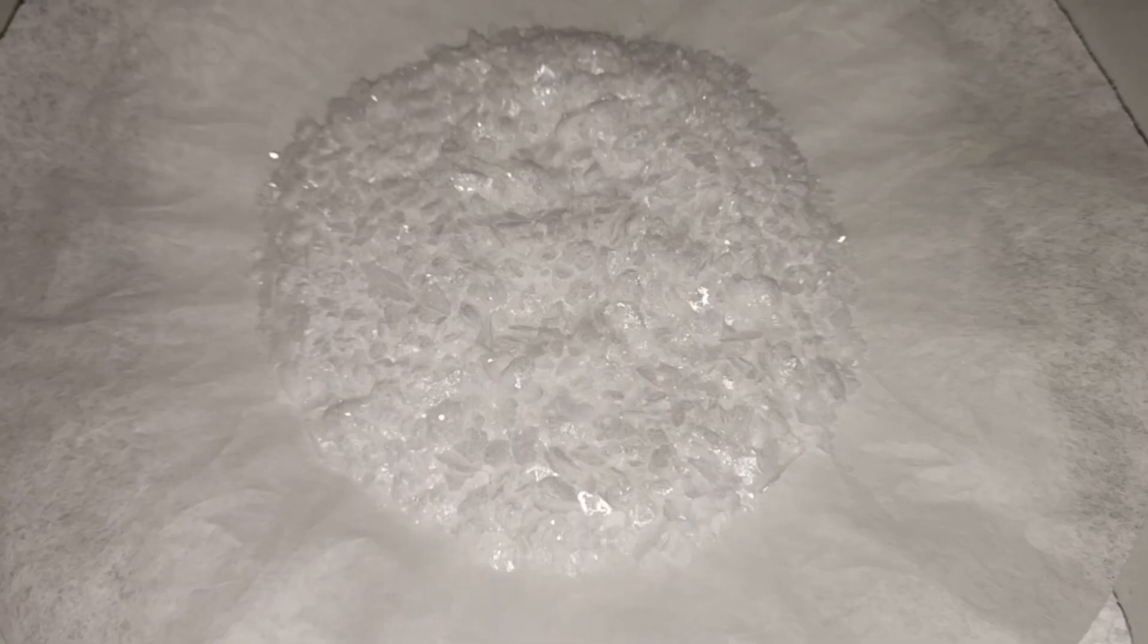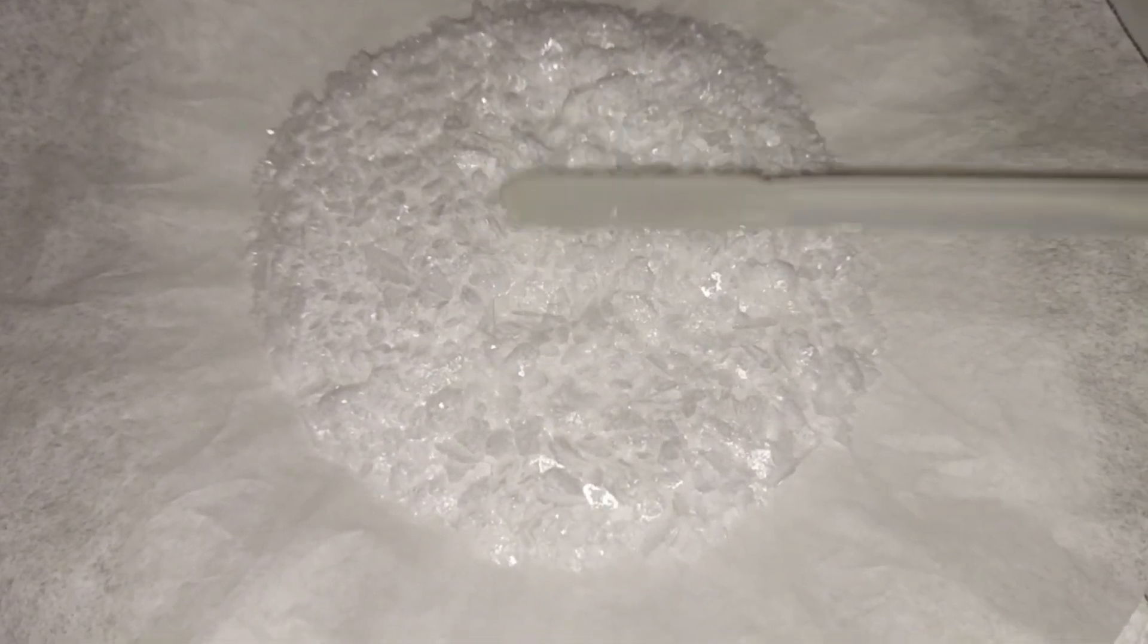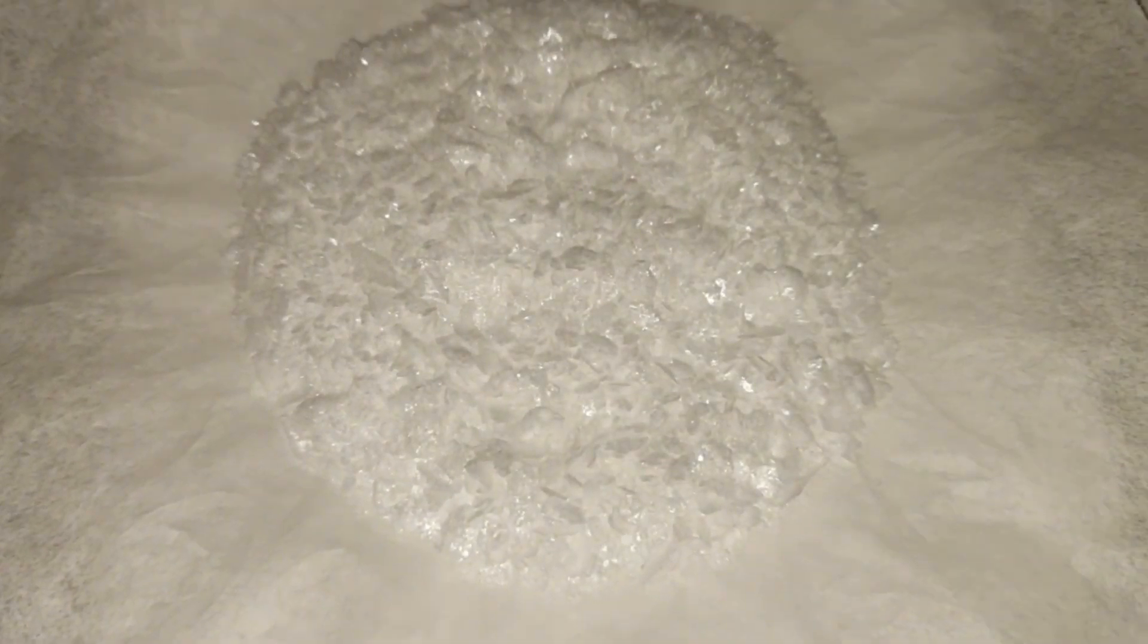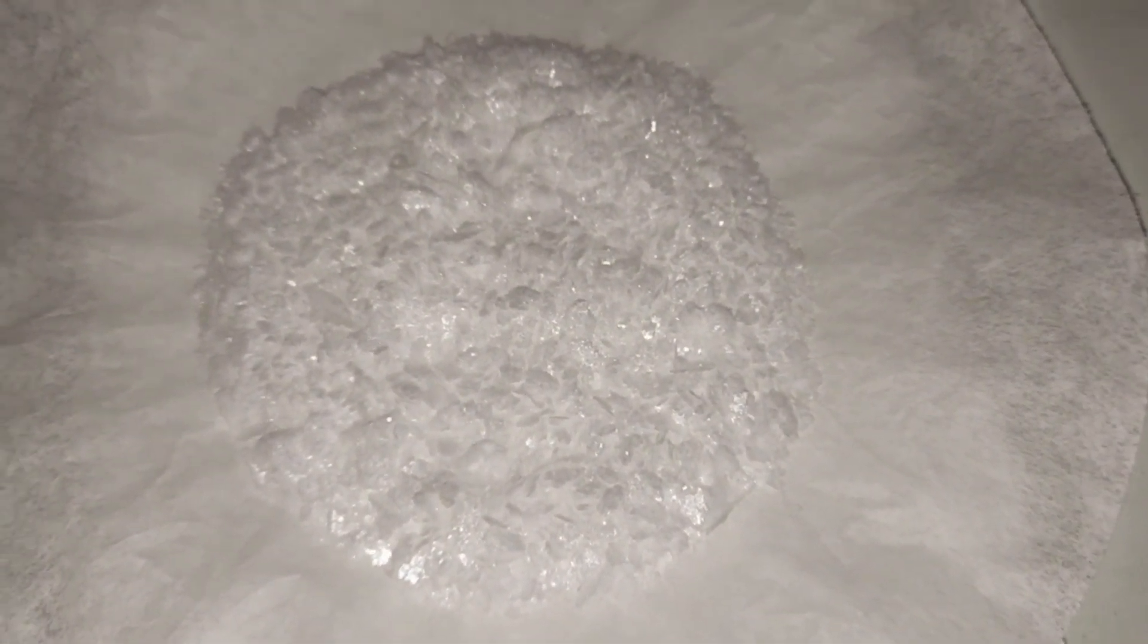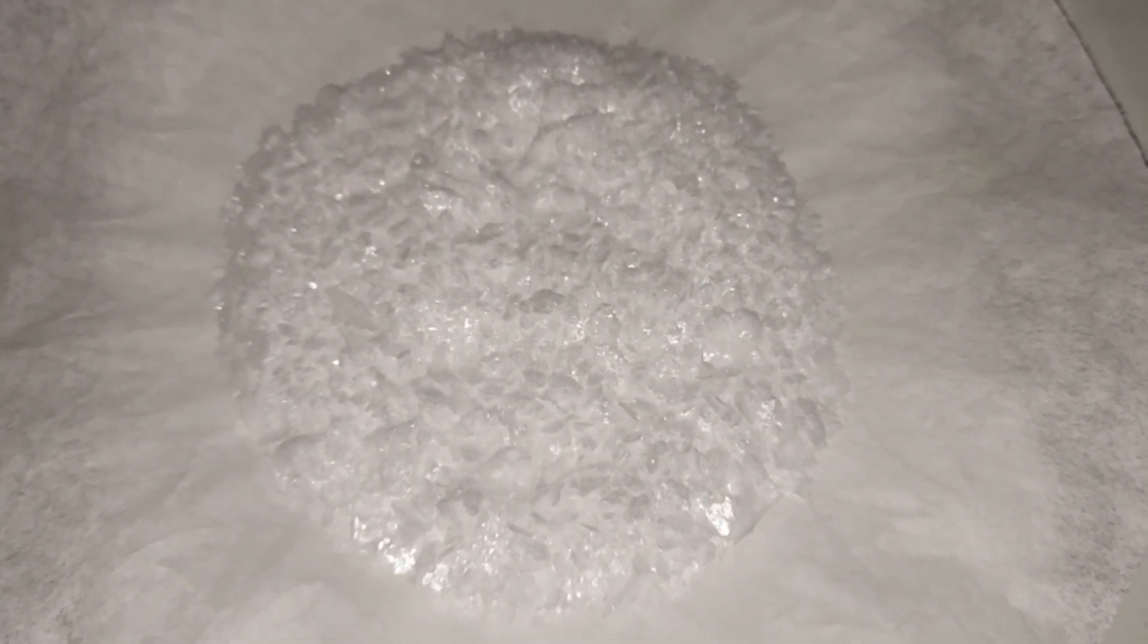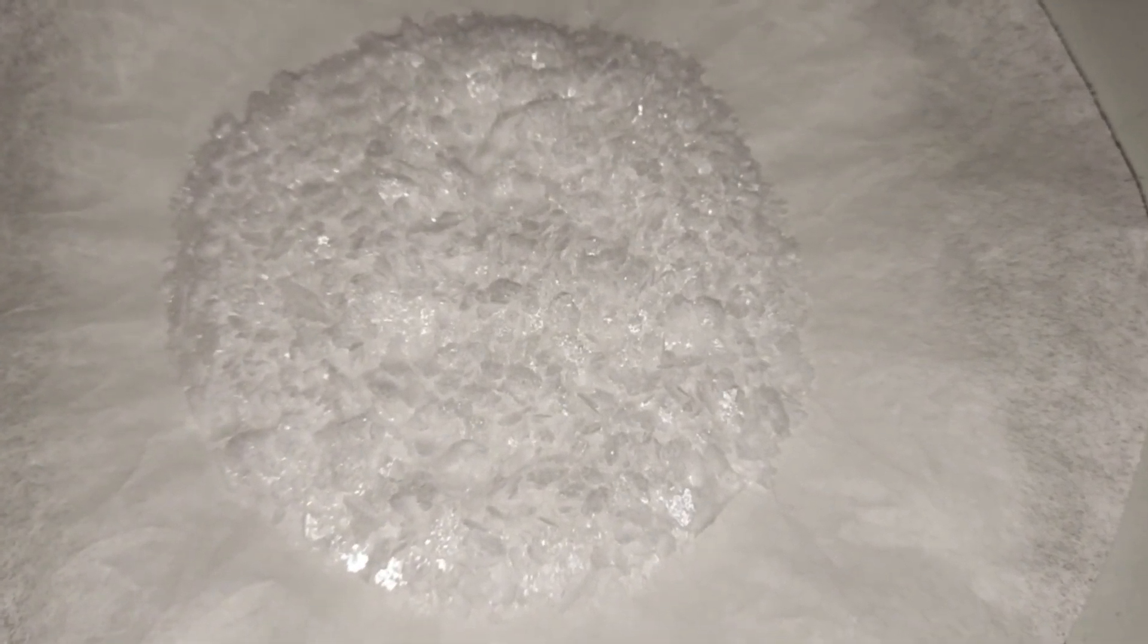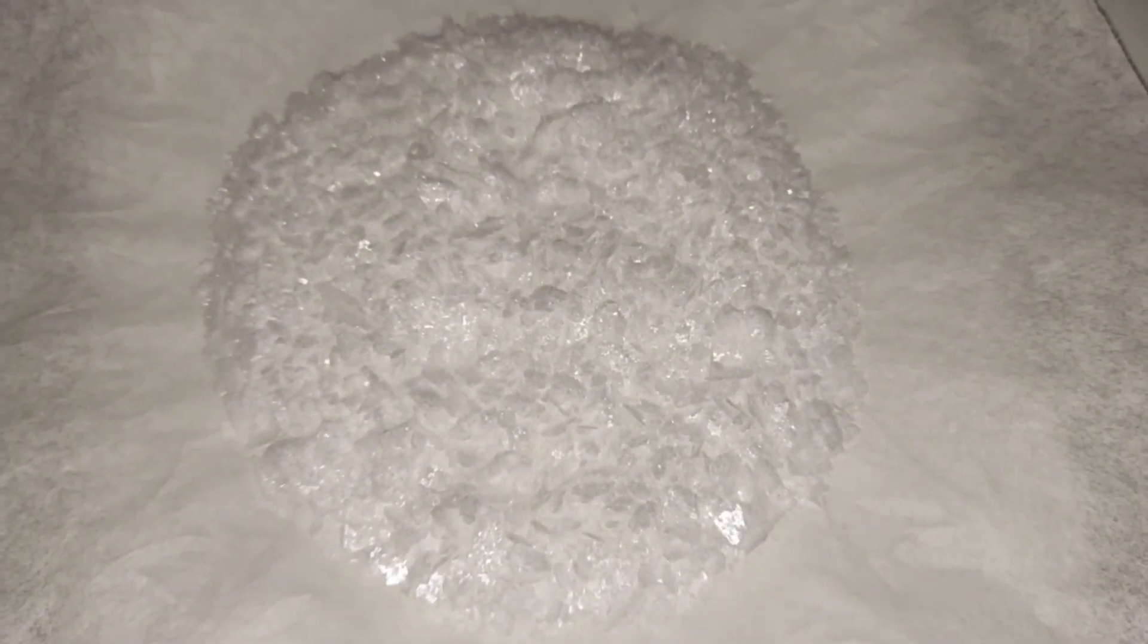Here's the final pile of dried potassium chlorate. I weighed it and it turned out to be exactly 25 grams. I think I could have got a greater yield, but I over boiled the bleach in the beginning unfortunately. But I'm gonna test this now. Try some flash powder testing the homemade potassium chlorate with a flash powder with dark aluminum.